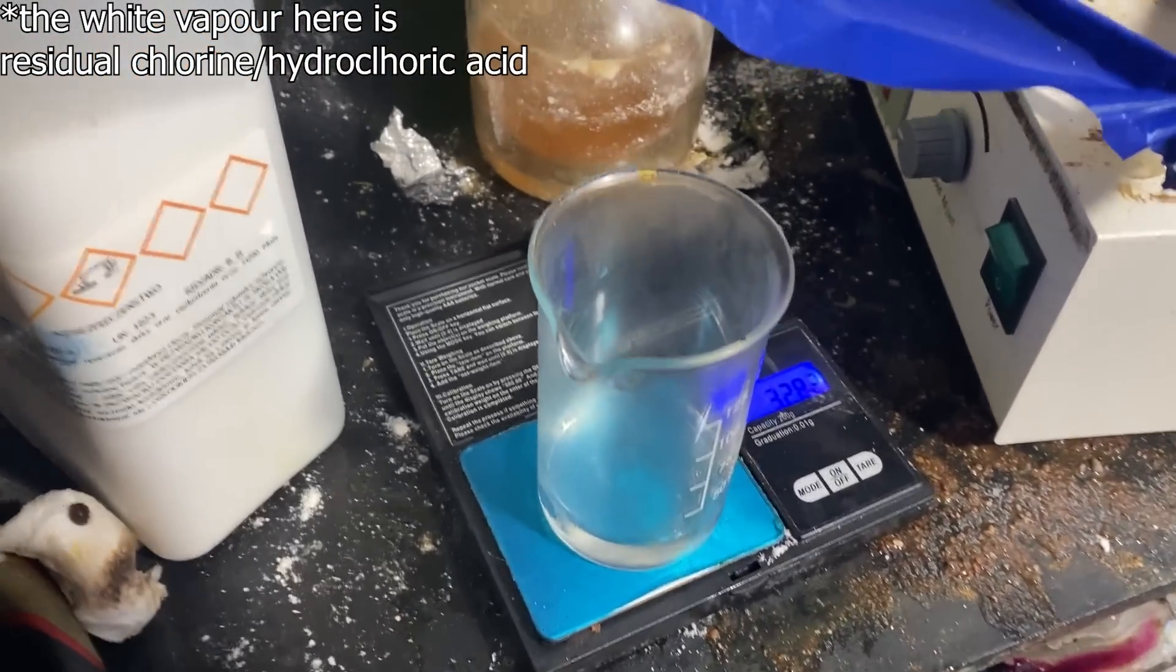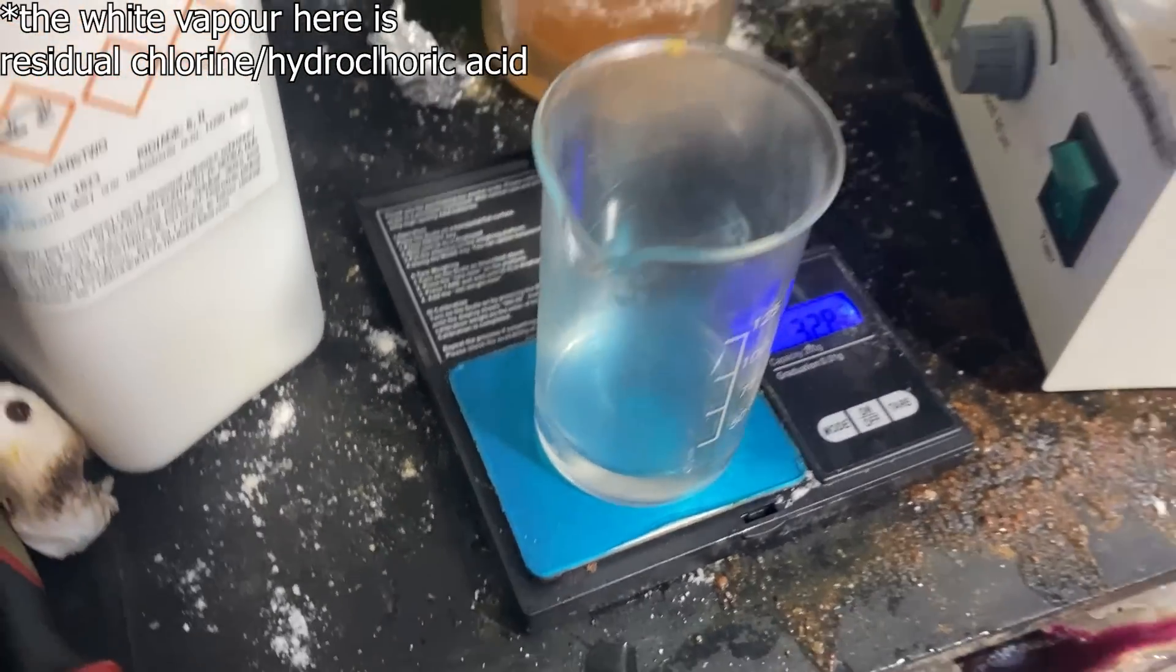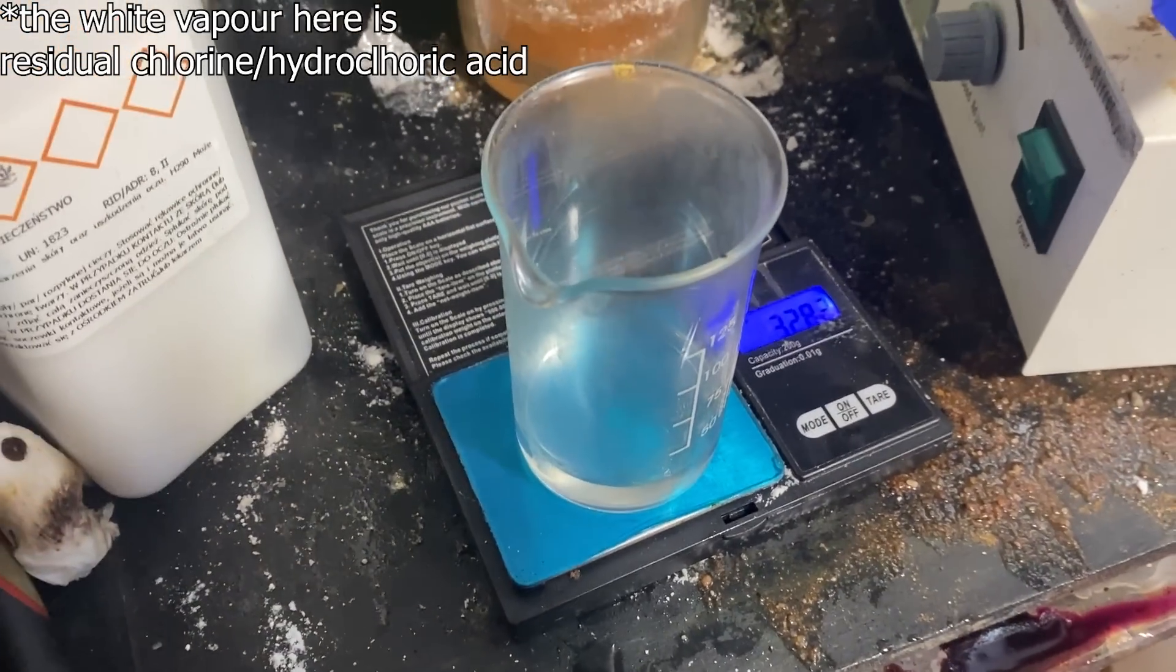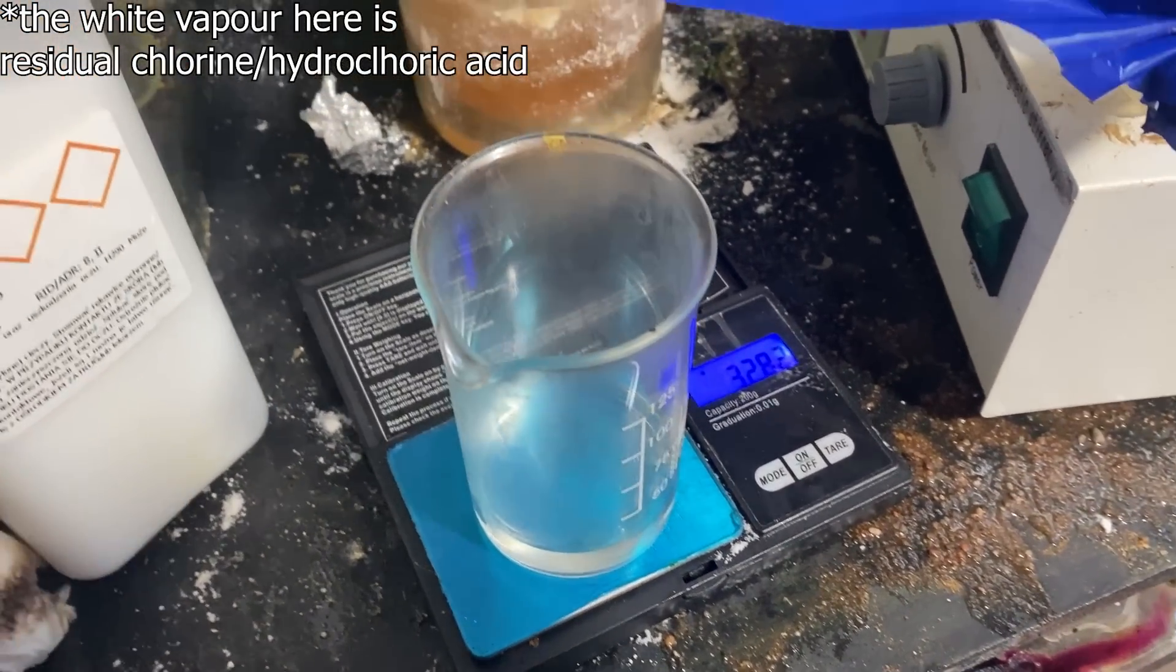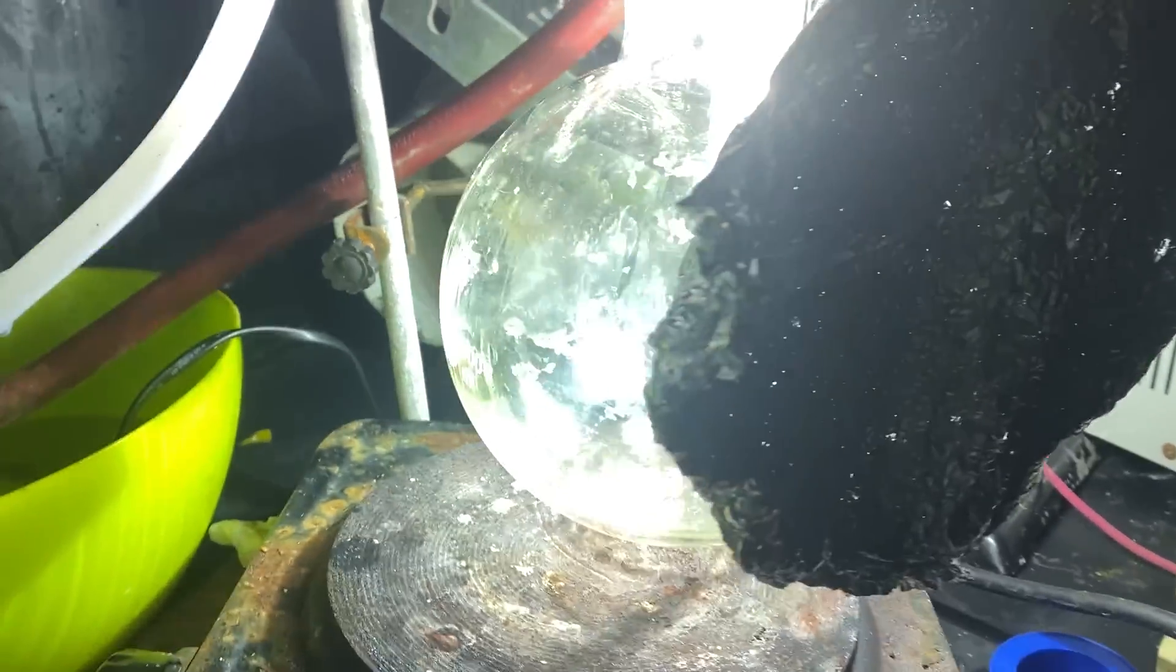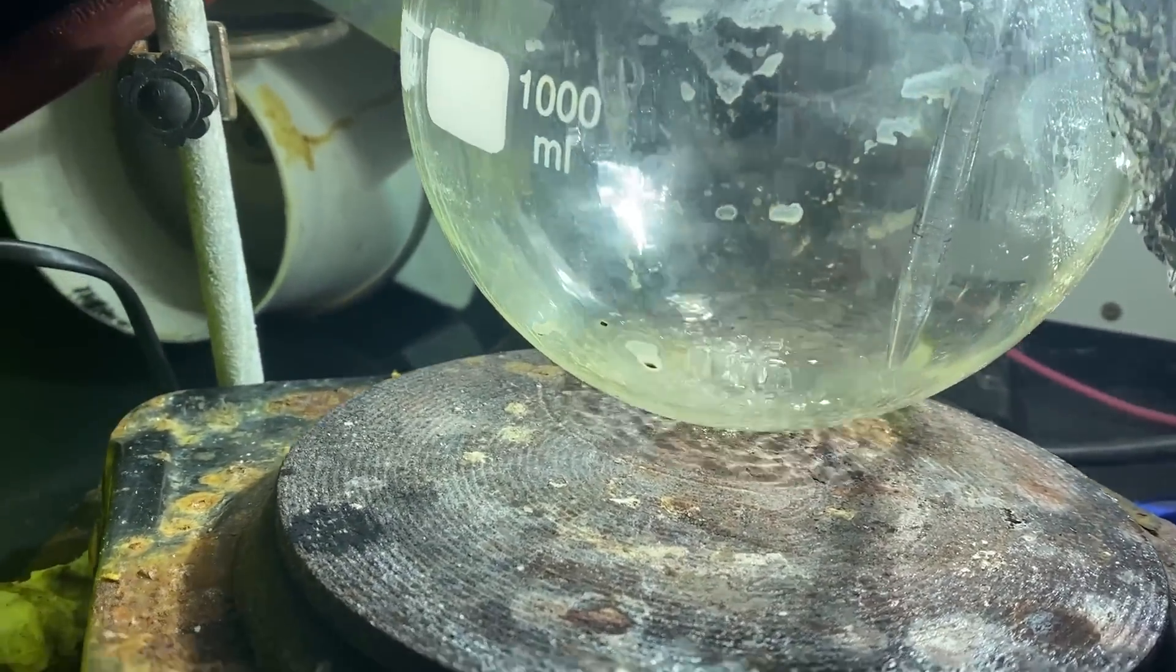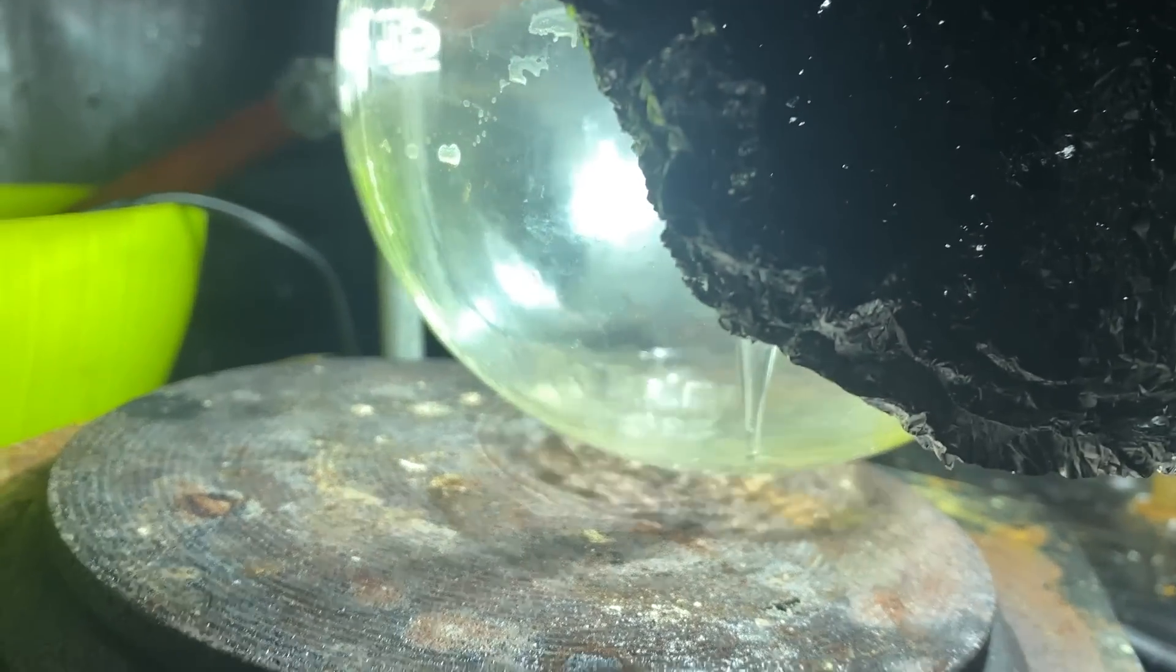Anyway, eventually I've weighed it out, and somehow we've lost around 5g from the general mixture. And I have no idea where it went, and it really scares me to think where it actually went. However, it most likely either traveled into the gas trap or the actual input. That's because when chloroform was boiling, it generated enough pressure to actually condense in the dryer and the chlorine flask.